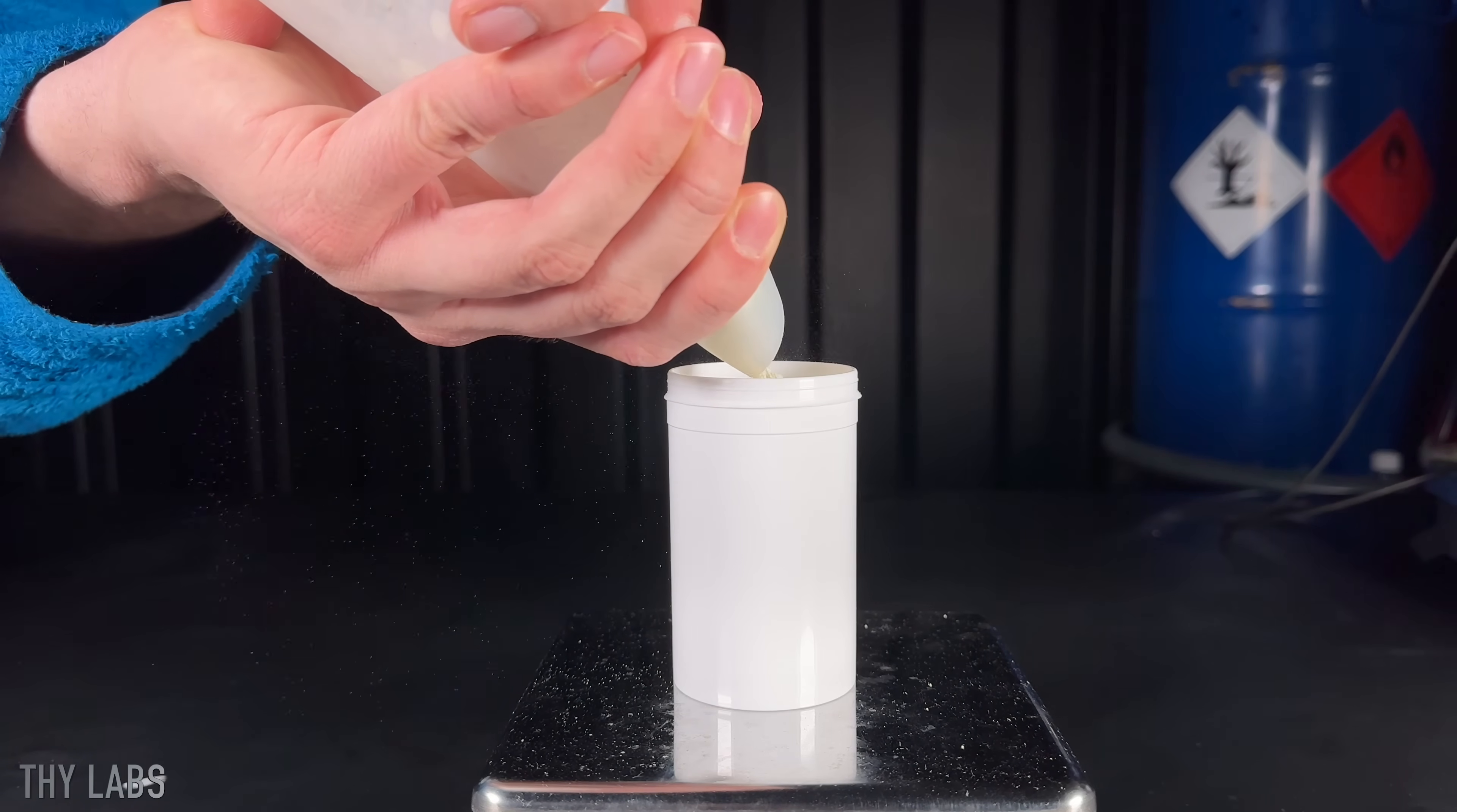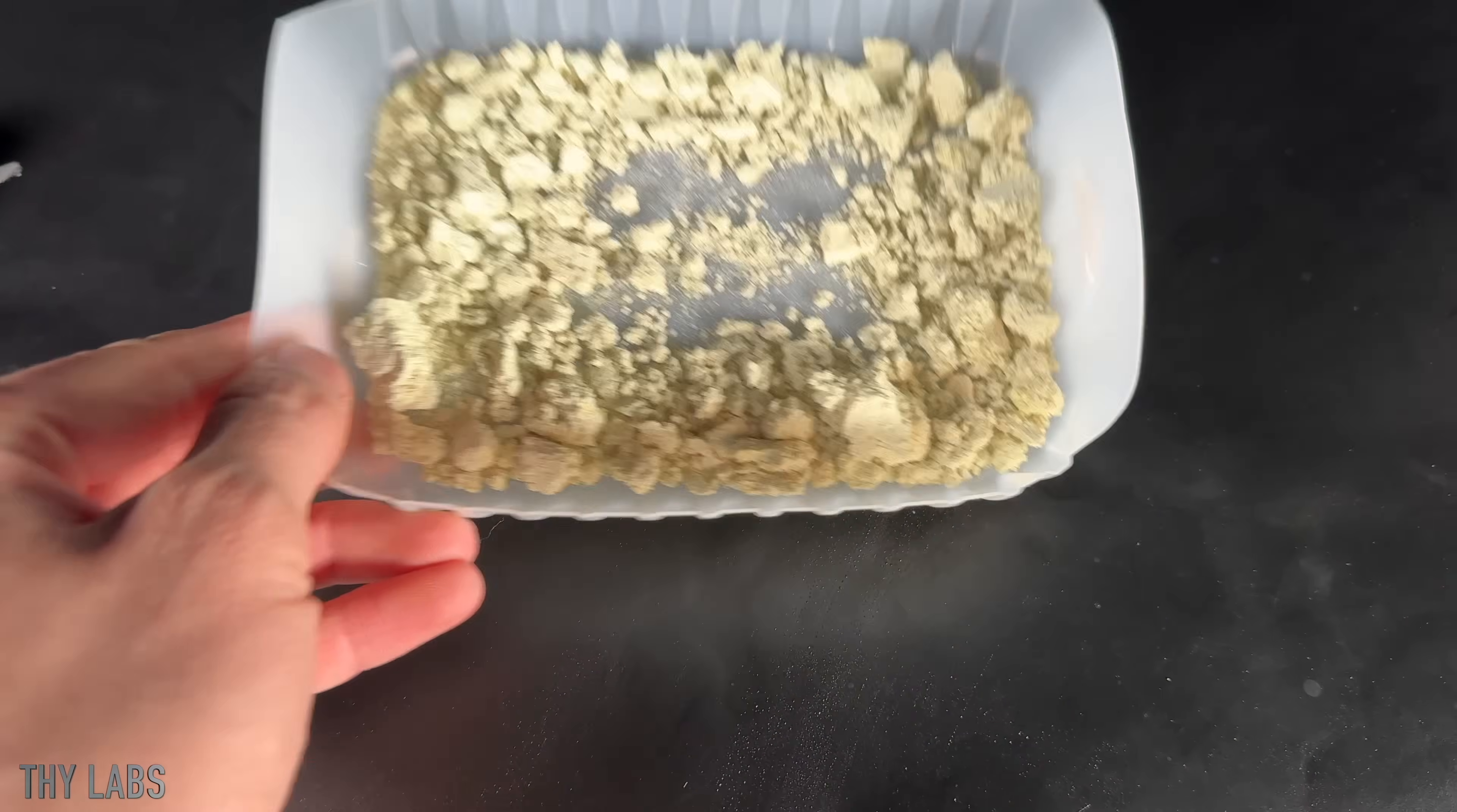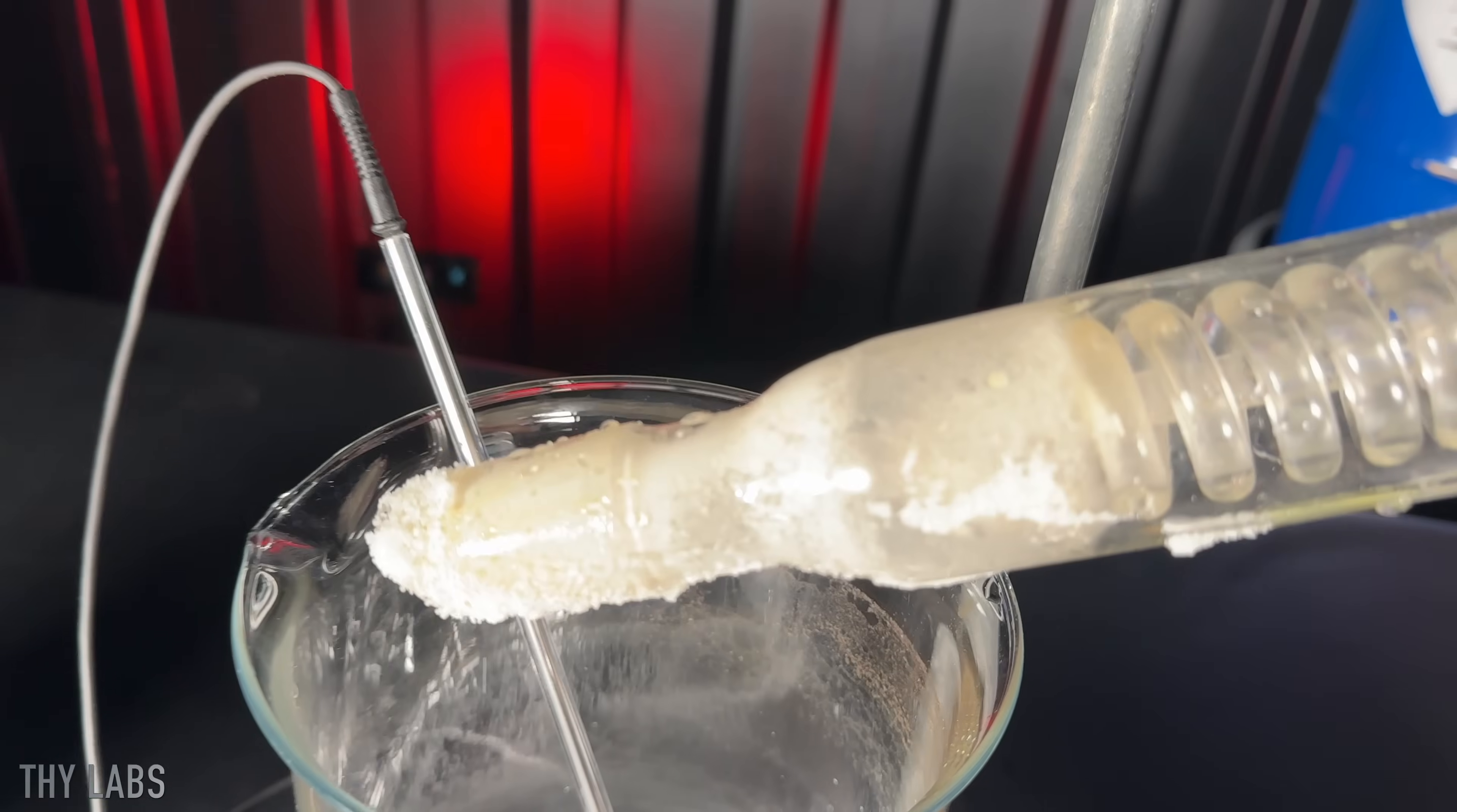To determine the yields, I transferred it to a pre-weighed plastic container and ended up with 15.3 grams. This is a yield of 46.4%. This is one of the worst preparations that I have ever done.